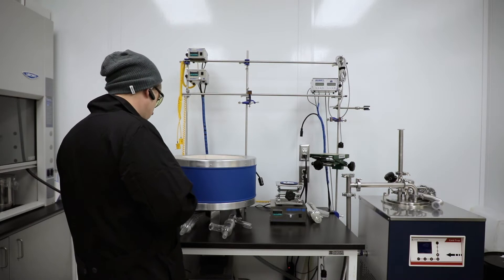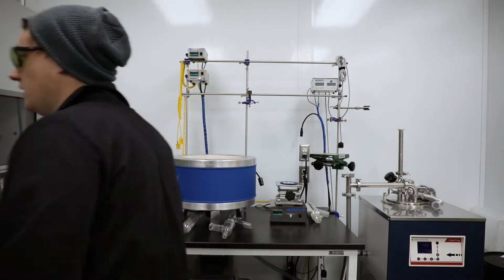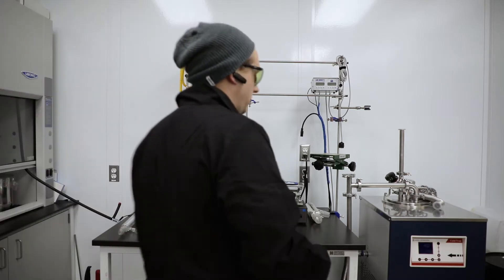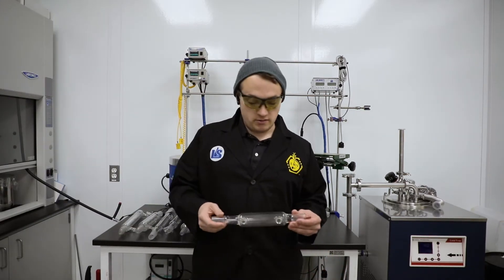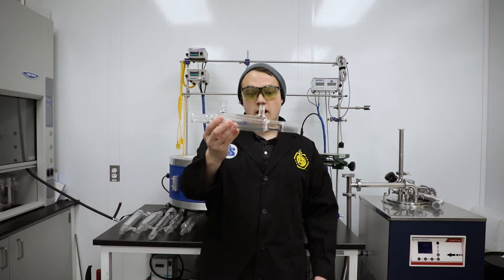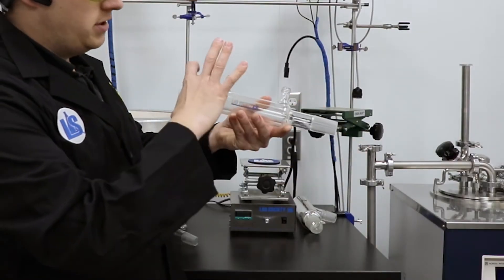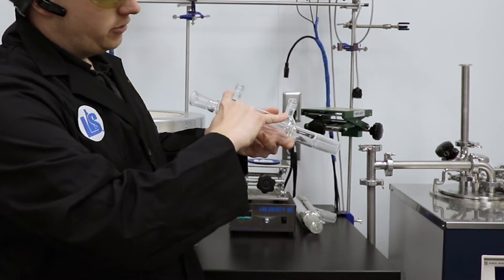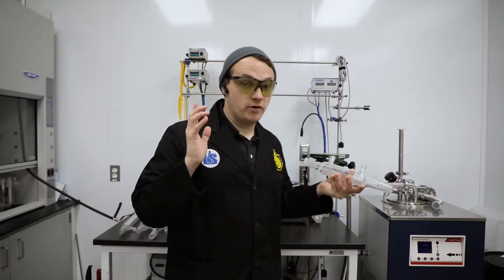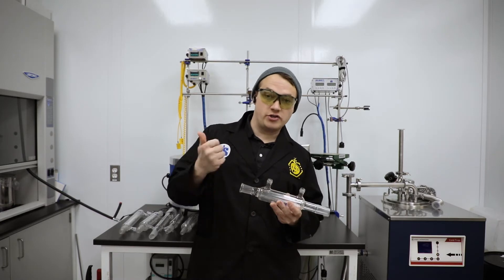The first condenser I'm going to talk about today is probably the most widely known and accepted condenser, at least in the benchtop short path space, and that is the Liebig condenser. Essentially all this is is a tube within another tube, and that outer tube is cooled by a liquid of your choice utilizing some sort of pumping mechanism, whether it be a chiller.